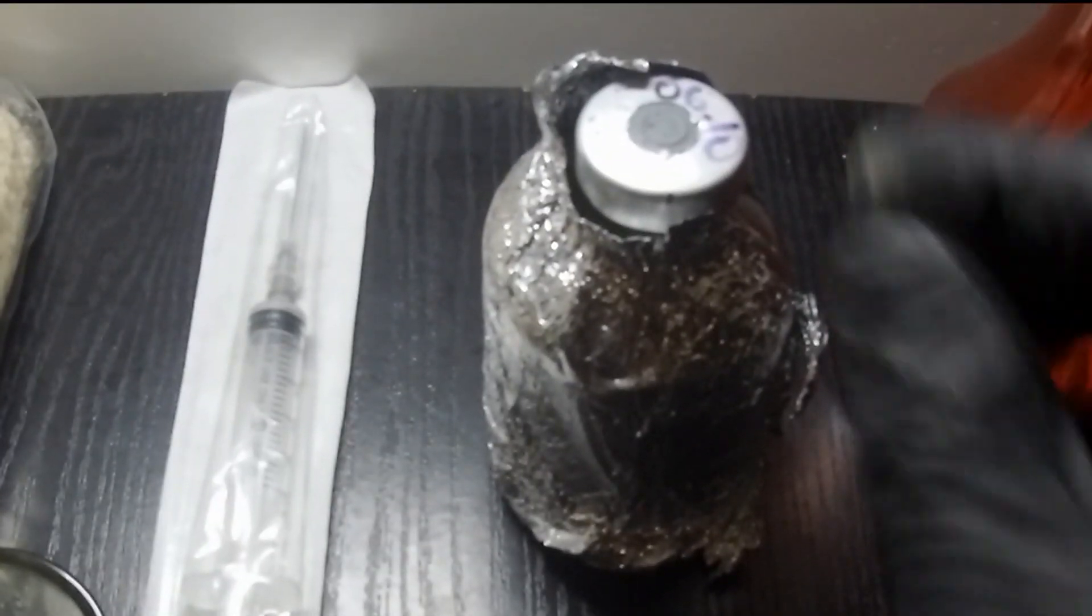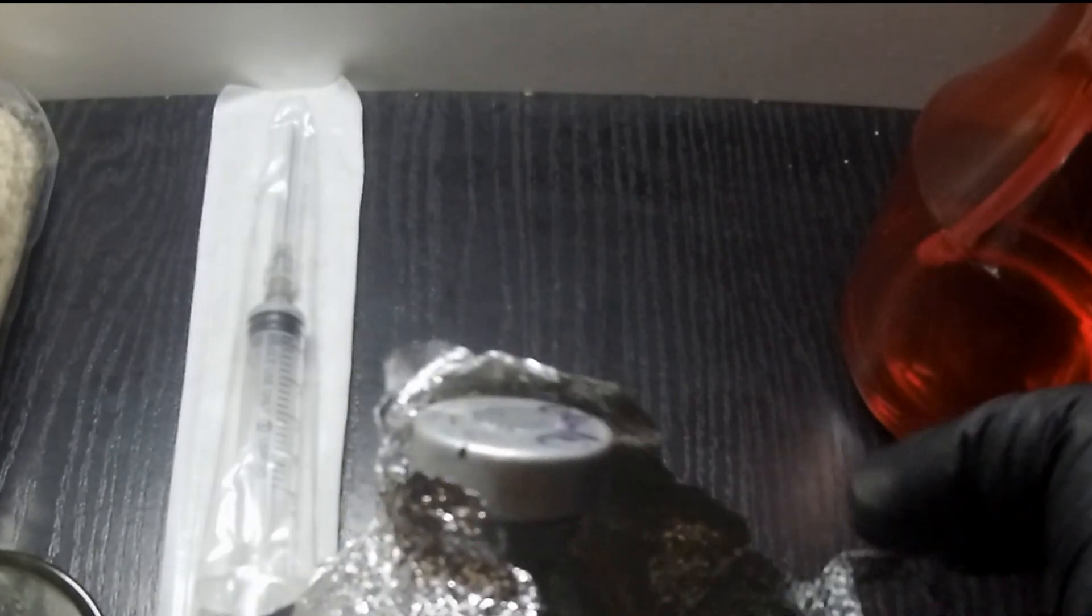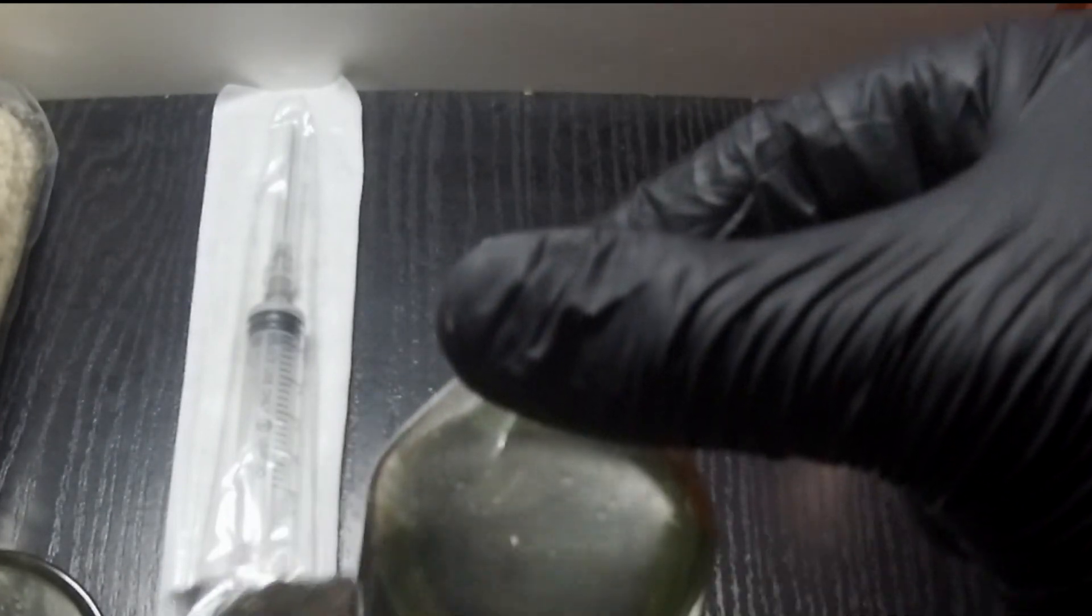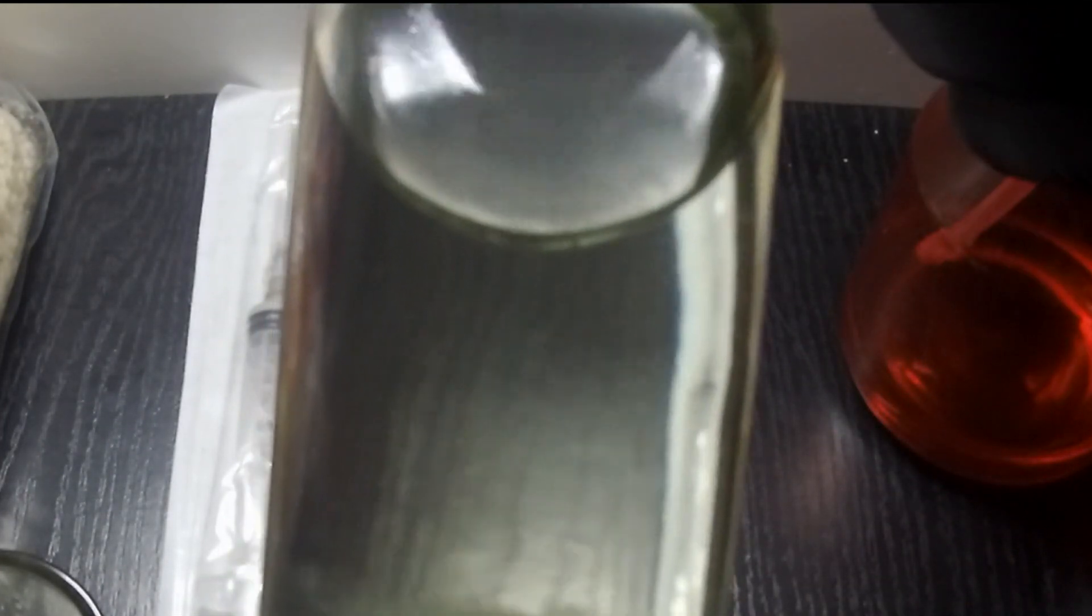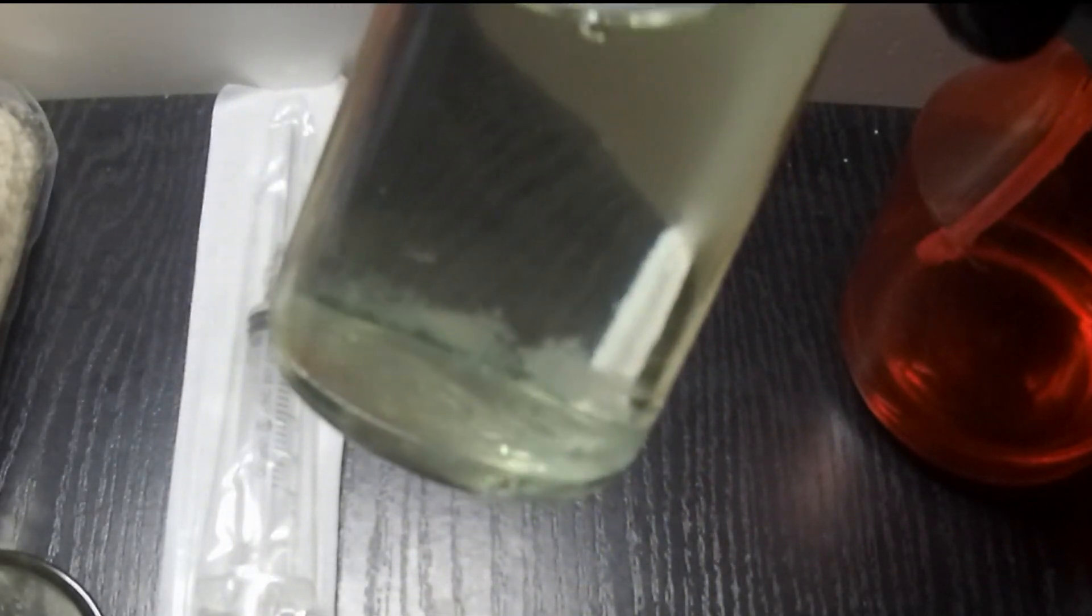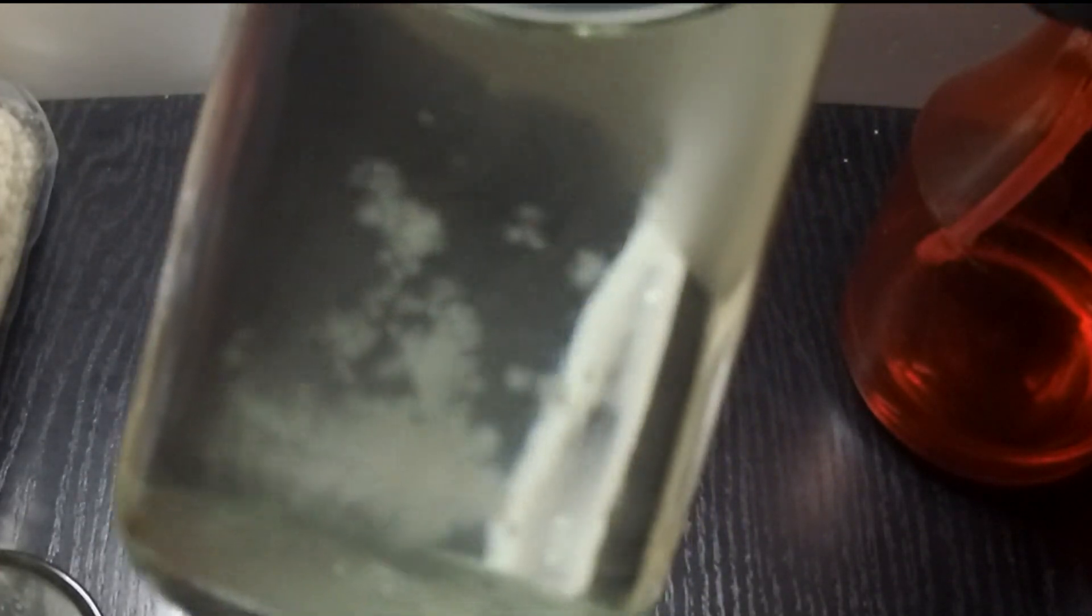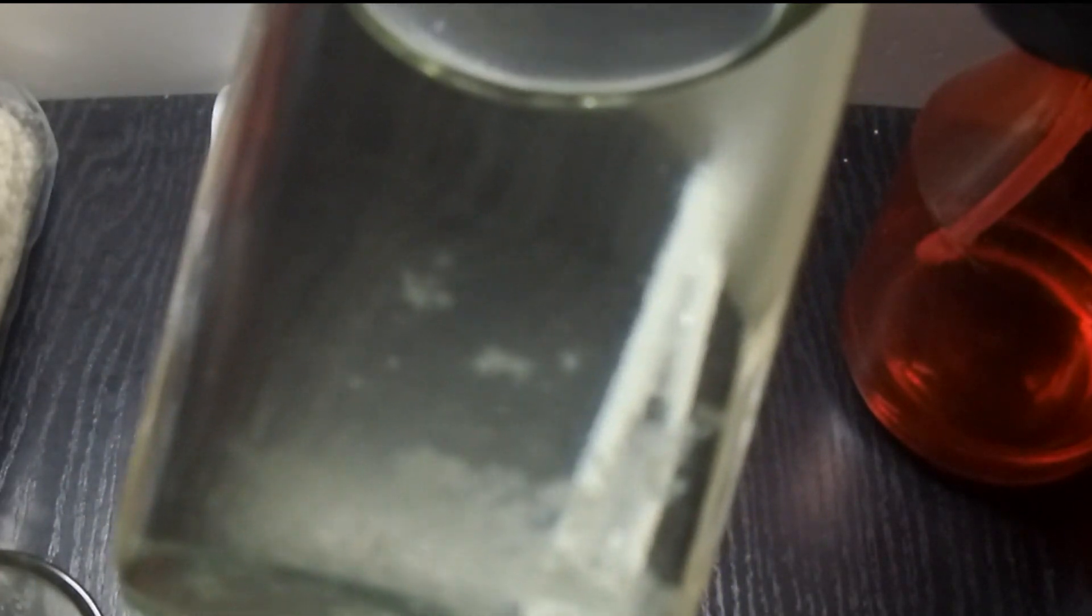In three days we should check on our vials. If we see a little jellyfish forming at the bottom, then everything is fine. If you do not have whitish formations in your vials after a week, then something went wrong and you need to do the thing again. In two weeks our jellyfish is big enough to inoculate the grain.